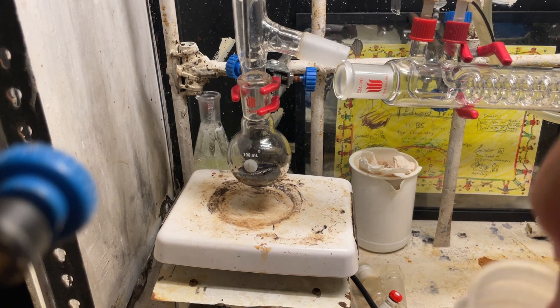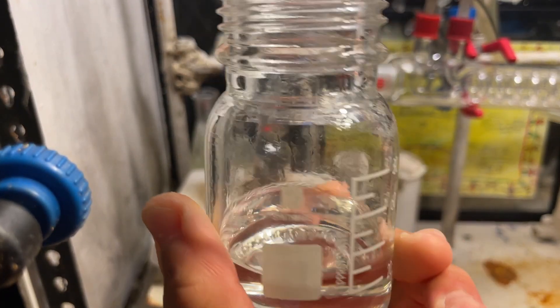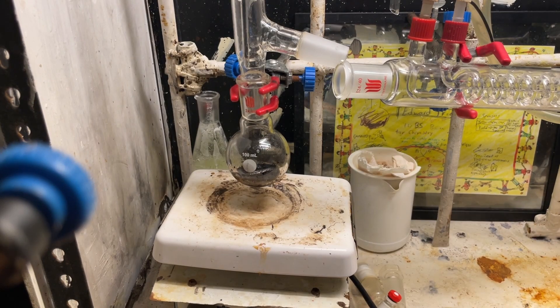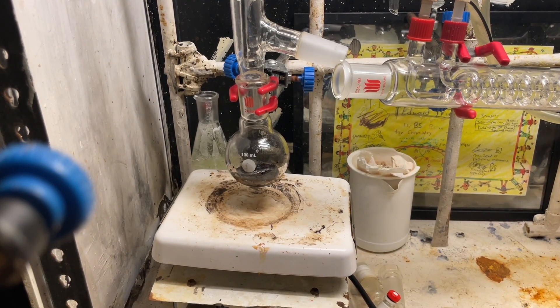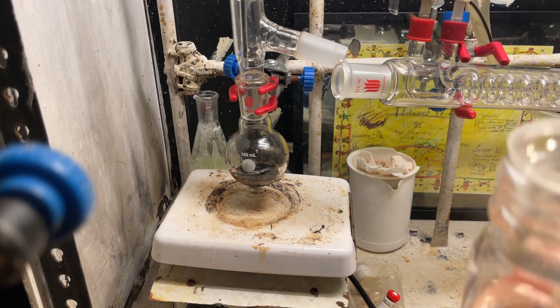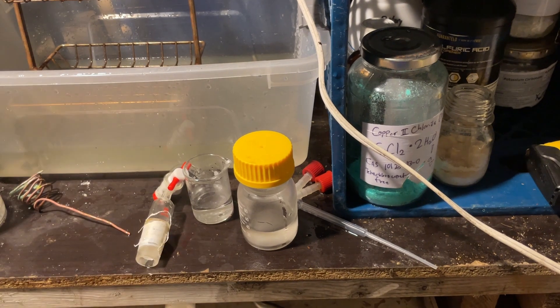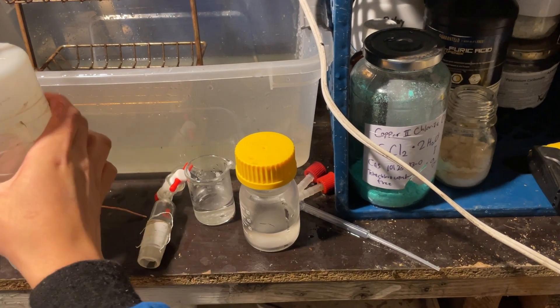So, here's our final yield, I'm showing you the cap, around 40 milliliters. Honestly, not bad, but fumes in air like crazy, so I'll make the end. So anyways, let's actually verify this is chloral. Now, this is a few days later, of course, but let's see.